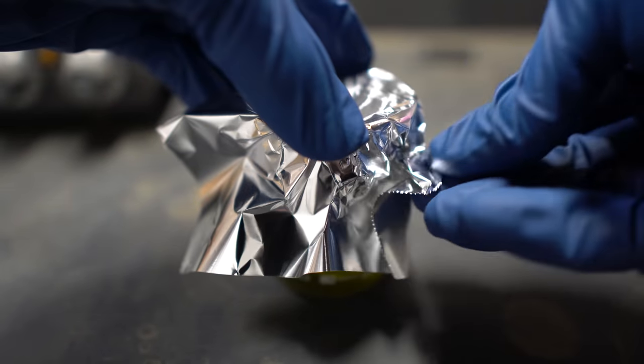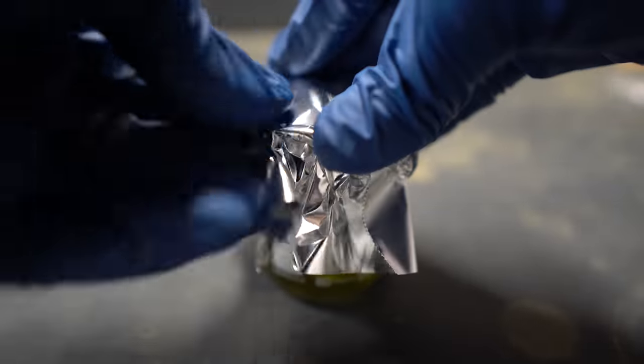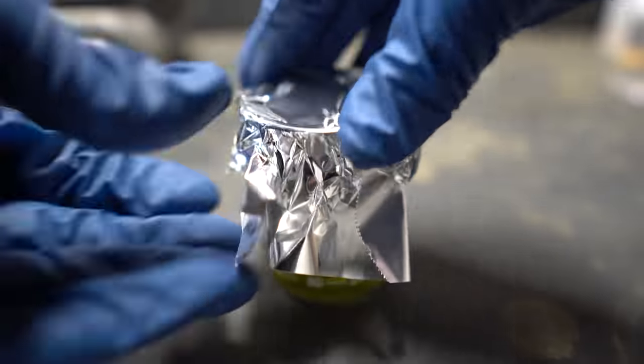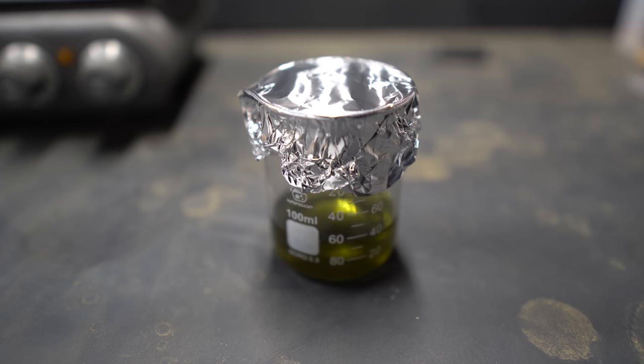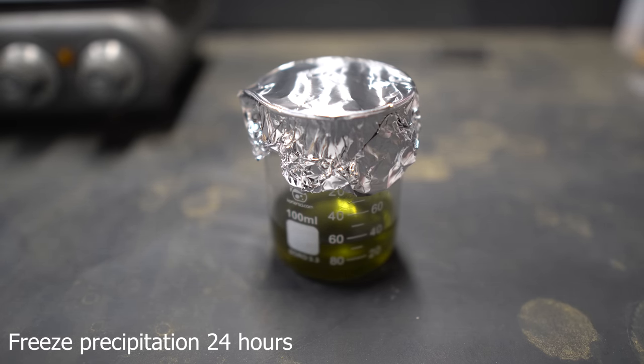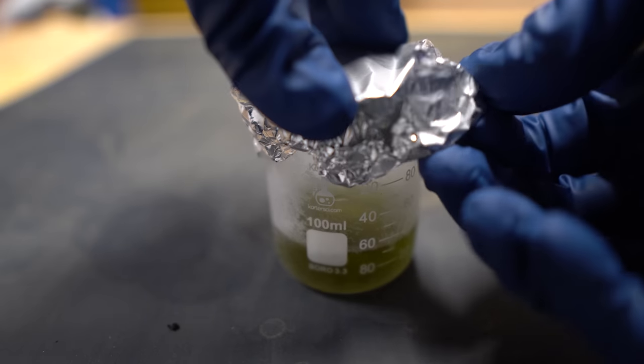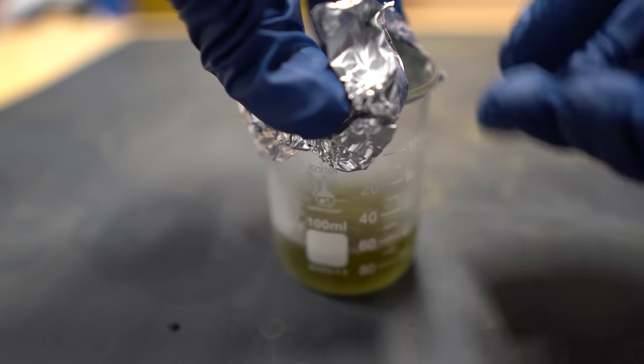It's important to not use too much of the solvent or too little. We're also going to put this into the freezer so we can reduce solubility as much as we can. We're now going to freeze precipitate this for about 12 to 24 hours. I'll show you the crystal formation difference between about six hours and then 18 hours later for the second recrystallization.